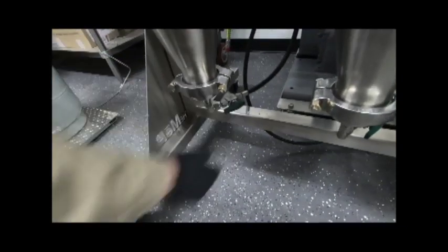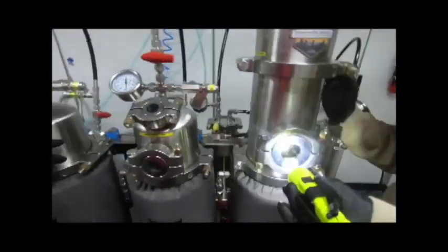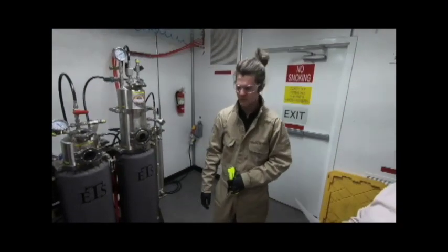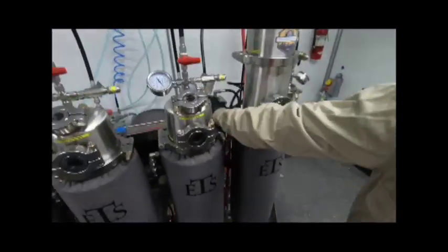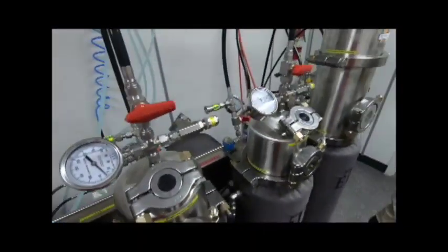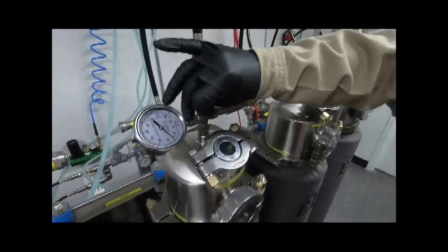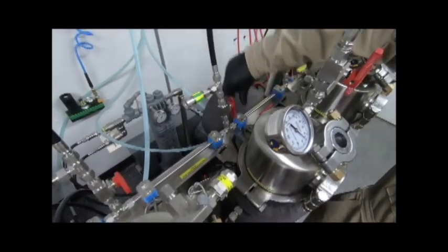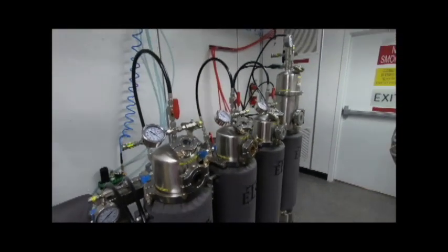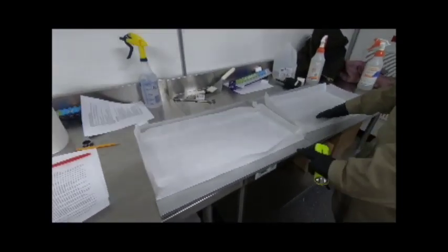Verify level of slurry in collection column is considerably less than halfway. Open all six red inlet valves located at the top of the extraction column one through three, allowing any residual gas to flow out of the entire system into collection column.